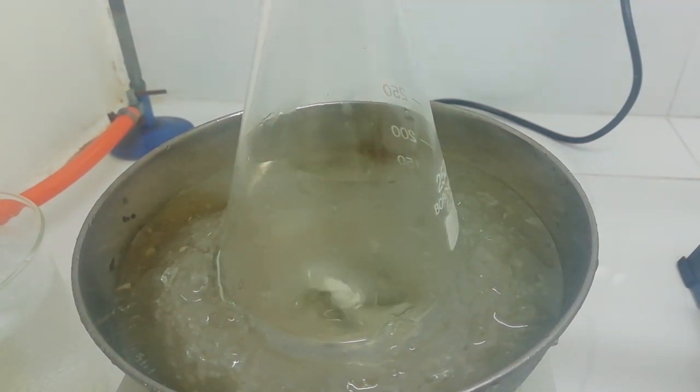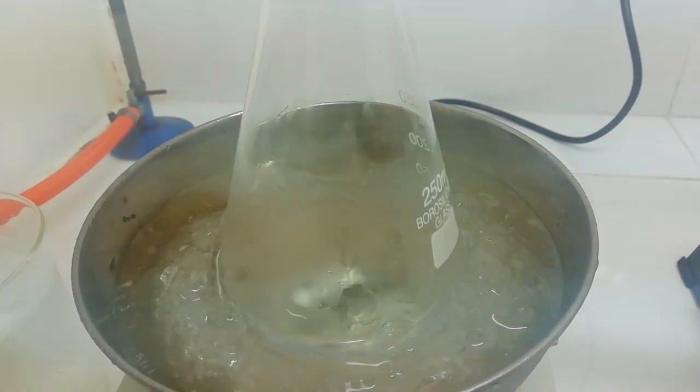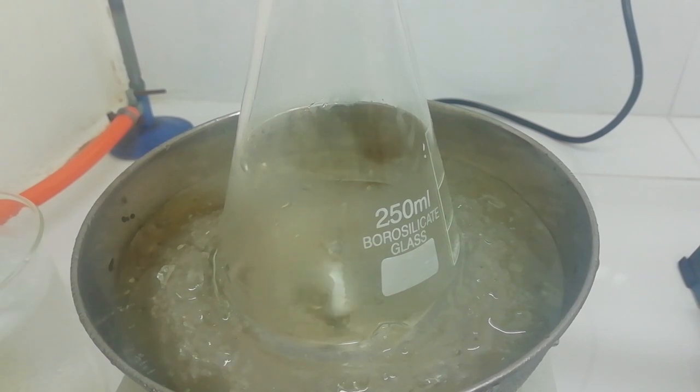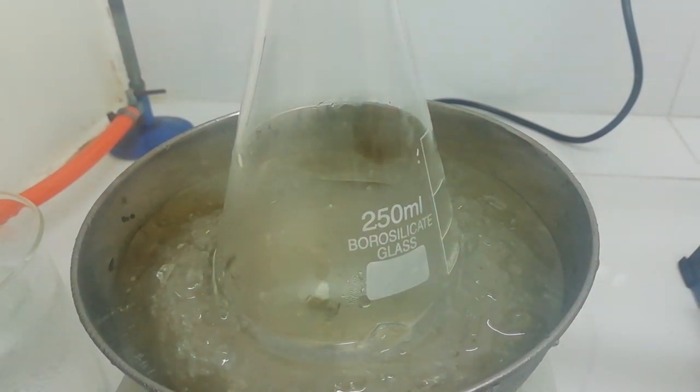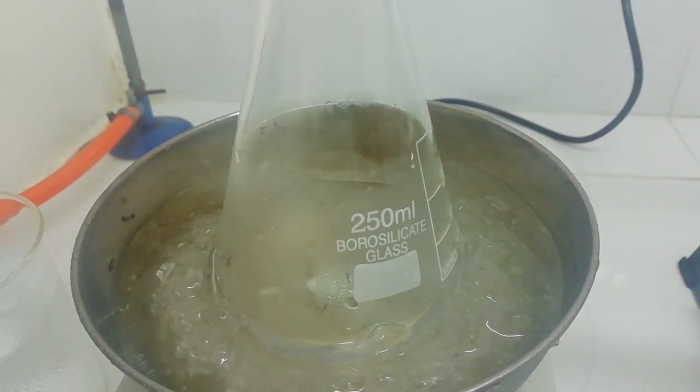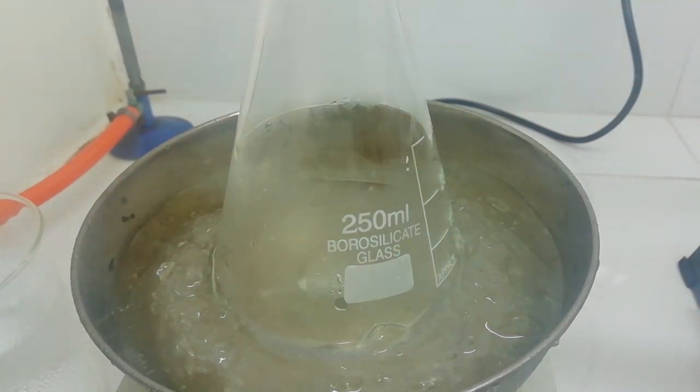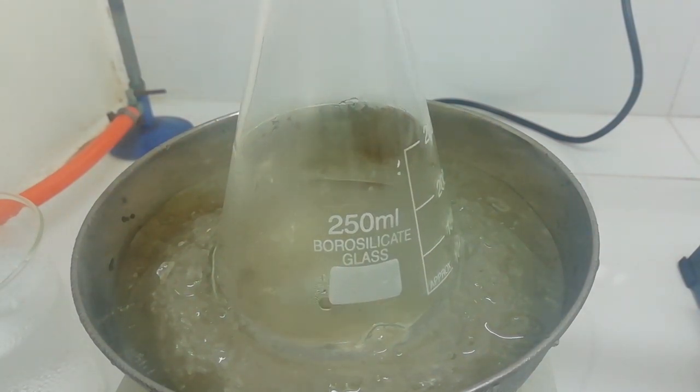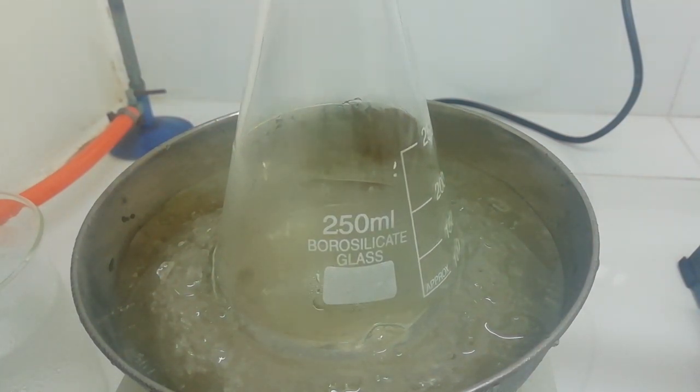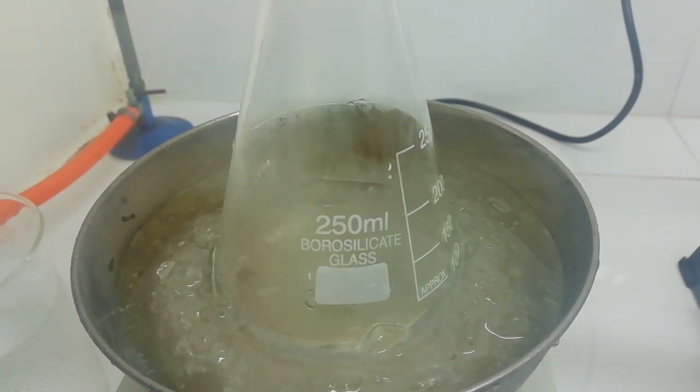Now I am going to mix these acids together and then distill our red fuming nitric acid. It is very important when we mix these concentrated acids together we have to add small portions.